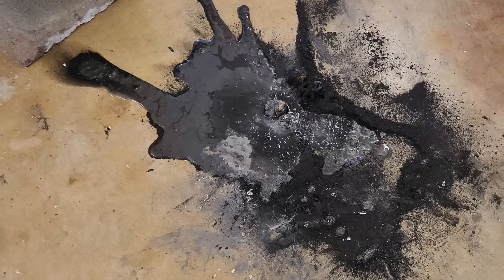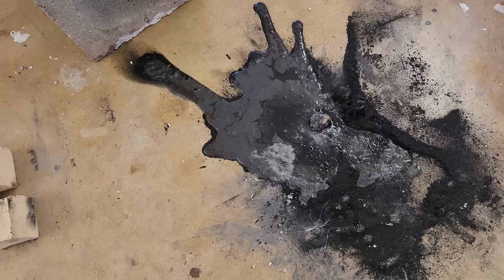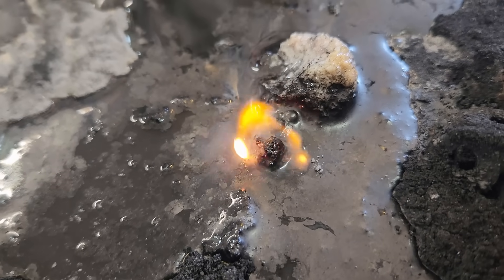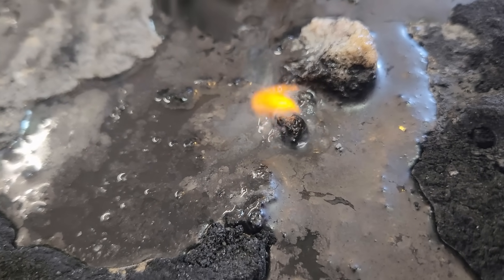The thermal stress would also crack the fire brick, which was a real nuisance, and I ended up dumping a bunch of the carbon-calcium mix at one point after the thing got busted open. When I was cleaning up, I threw some water on the ash and noticed some of it was bubbling, so I lit it up, and sure enough, it was carbide that was producing acetylene. So the process does work.